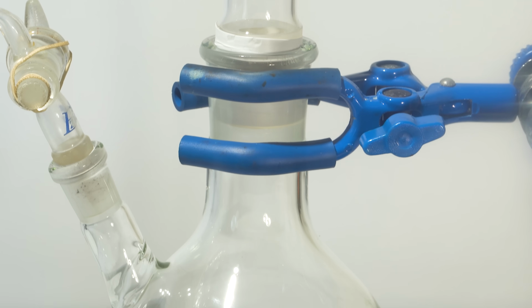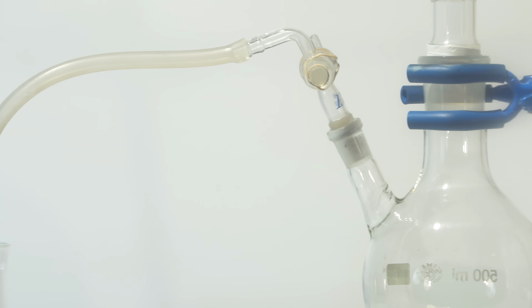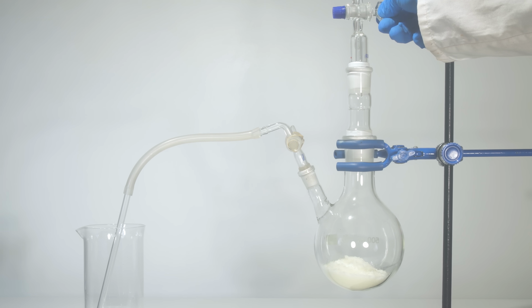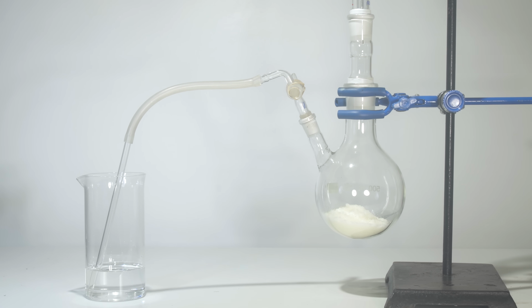The synthesis of nitrosyl perchlorate is quite simple. You just need to bubble a mixture of nitrogen oxides, nitric oxide and nitrogen dioxide into a solution of perchloric acid. Initially, I used commercially available 50% perchloric acid and produced the nitrogen oxides by dropping nitric acid onto solid sodium nitrite.